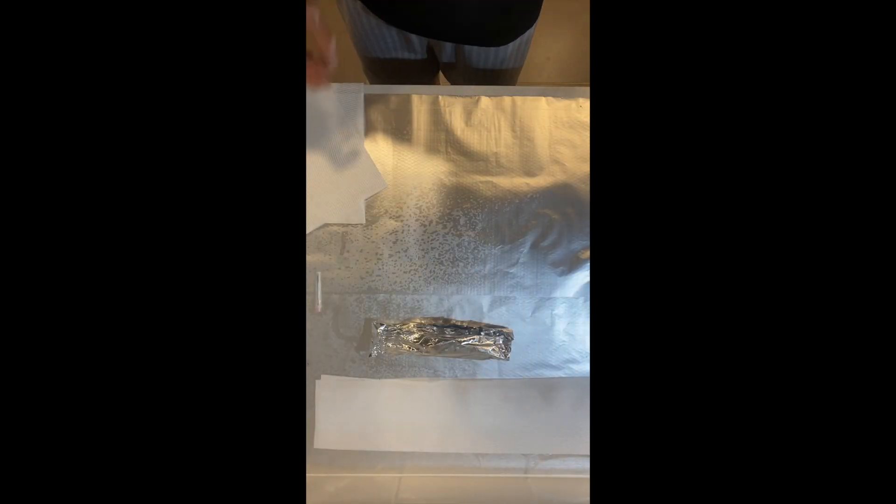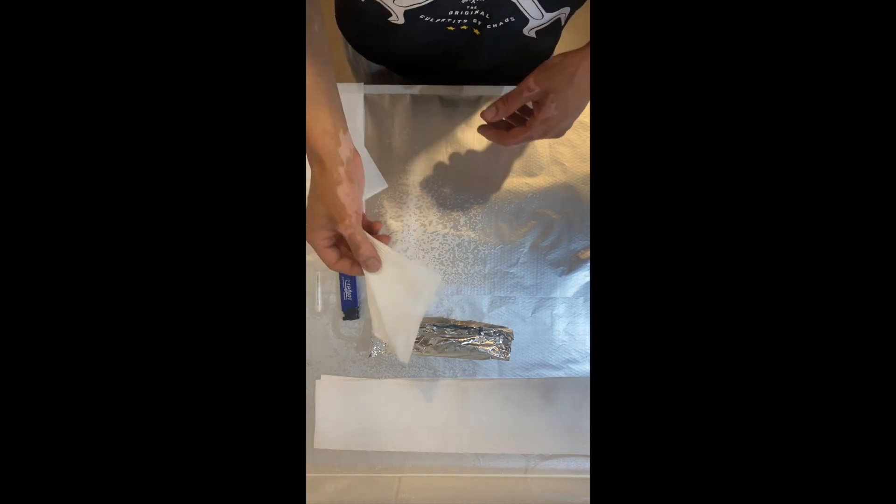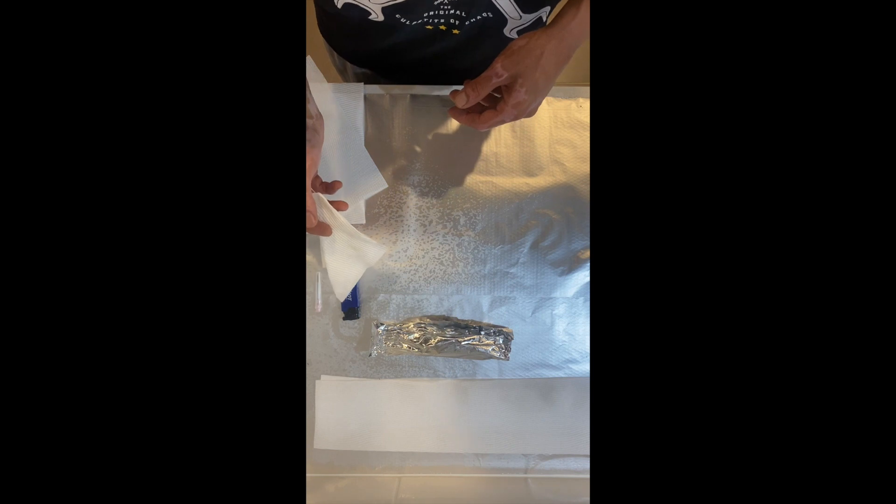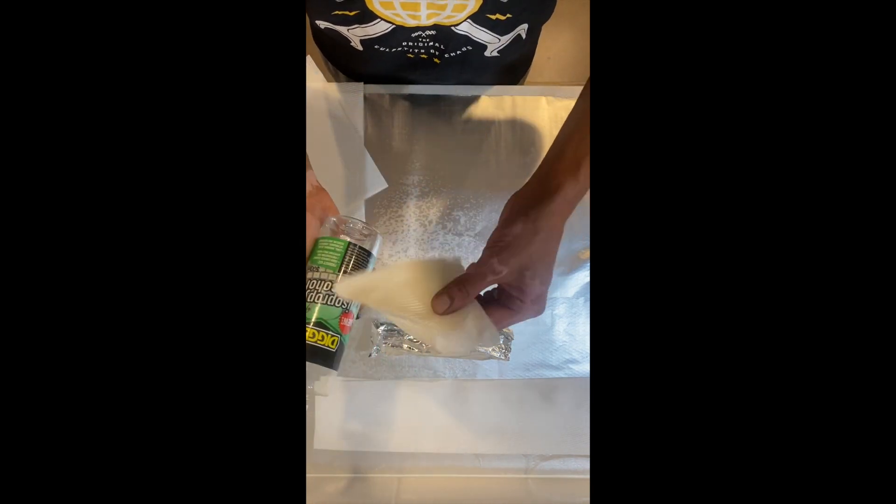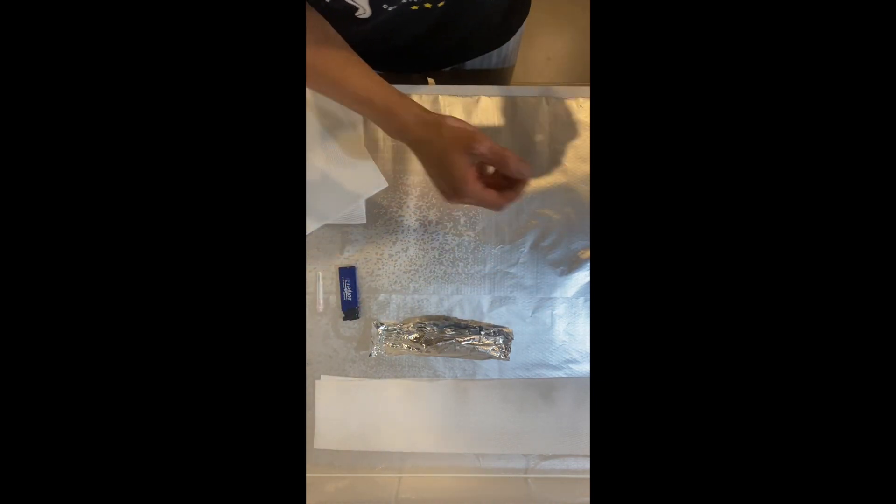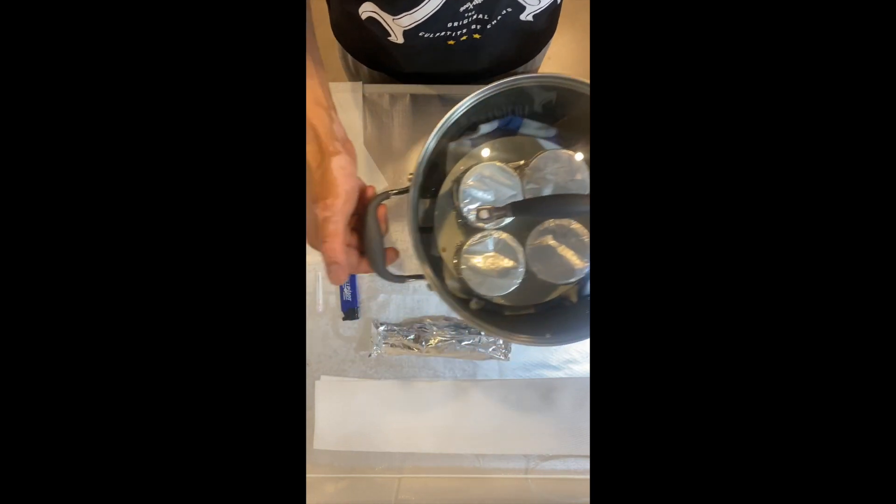Alright guys, we are ready to go. We've got our spore syringe, our jet lighter, our needle tip, we've got some isopropyl alcohol, we've got our paper towel over here, and we have our pot full of jars.